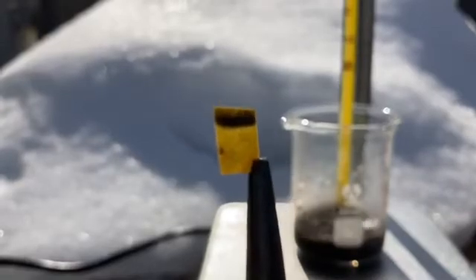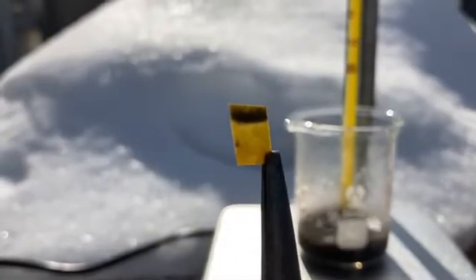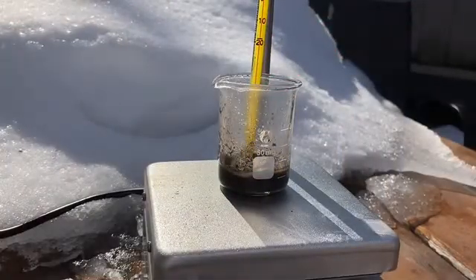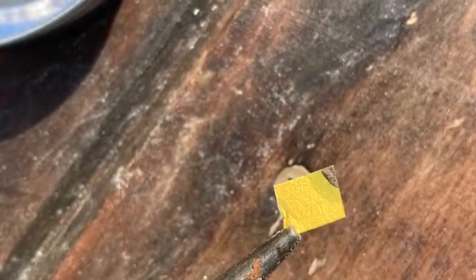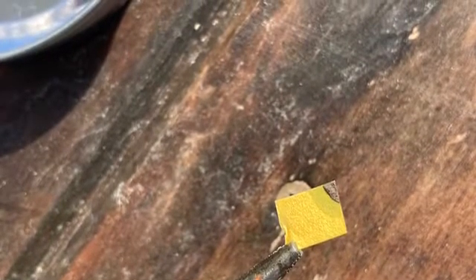It's very, very difficult to see here, but there is a green color and it's around a pH of 9 — the camera just can't pick it up. Now we can add our last couple scoops of the cyanamide and hydrazine sulfate mixture. Here you can see the pH of 9 with a nice green color.